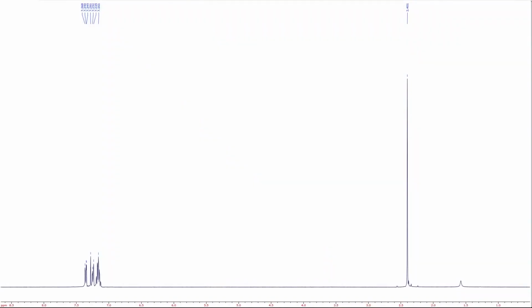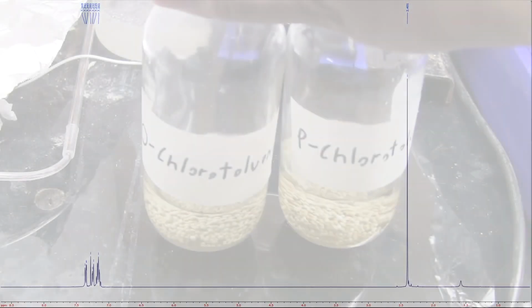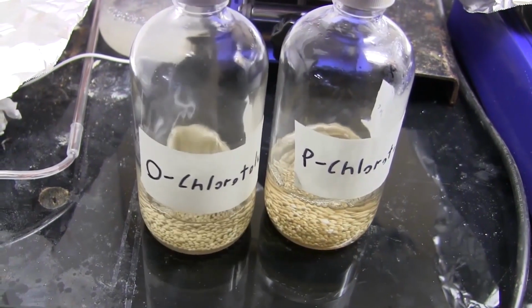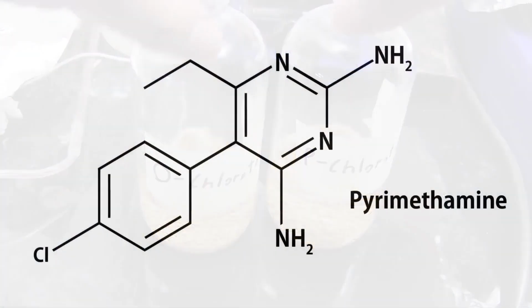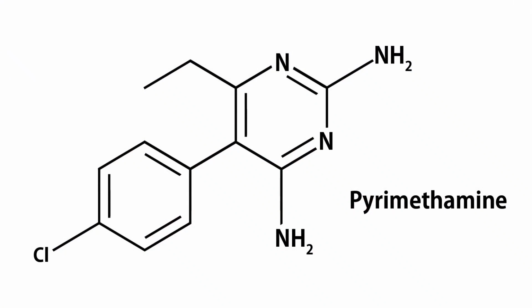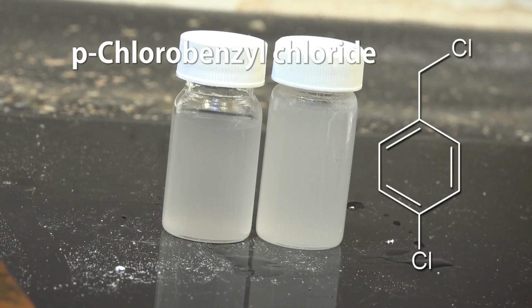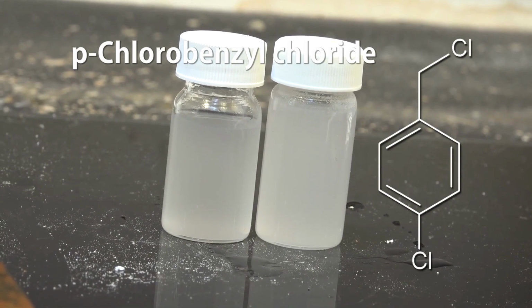NMR analysis shows I have reasonably pure orthochlorotoluene. That is how you use steric effects and sulfonation to separate ortho and para-chlorotoluene isomers. This is another step in our synthesis to the antiprotozoal drug pyrimethamine. We're going to make p-Chlorobenzyl chloride, also known as 4-chlorobenzyl chloride.